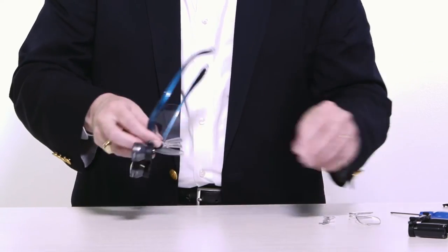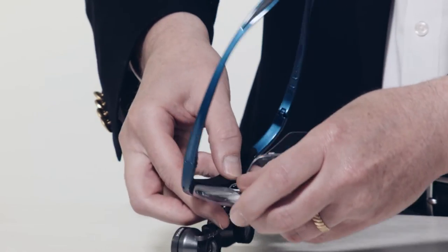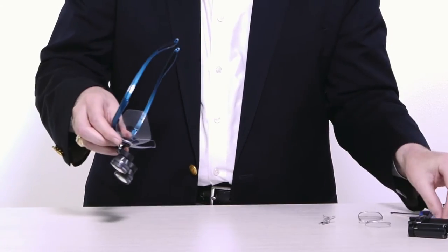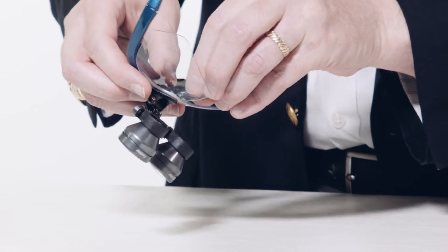You can have your vision prescription inserted into the supplied holder and attach it to your frame or change the supplied nose bridge and wear your spectacles over your sport frame.